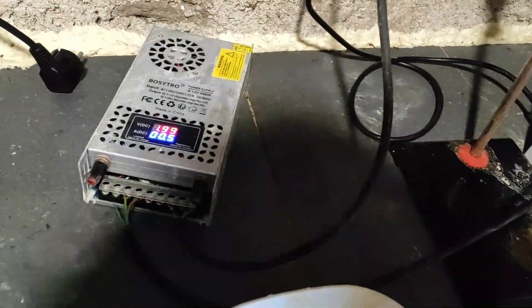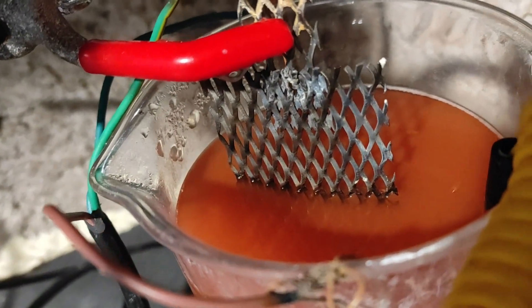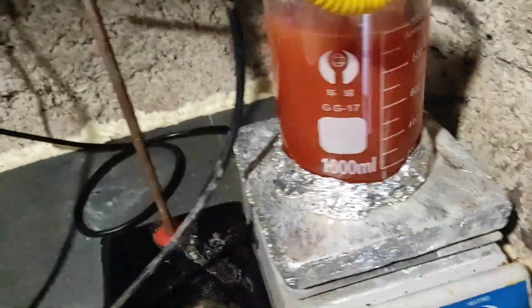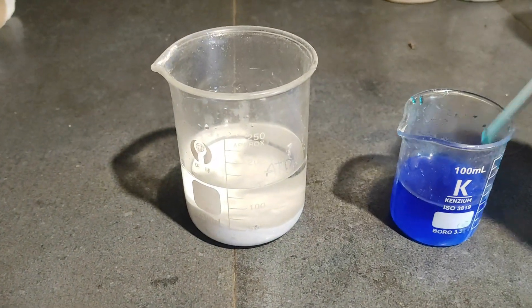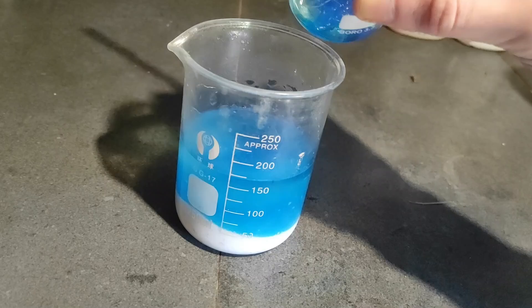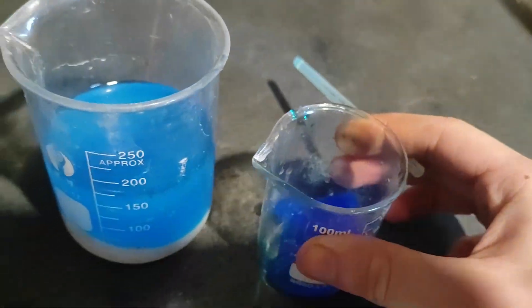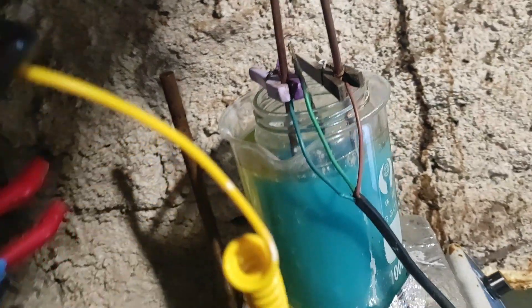Now that we have our ATO-plated titanium, the last step is to coat it with lead dioxide. There are actually two different plating baths we can use. I already showed the alpha plating in the last video using lead(II) oxide and sodium hydroxide. This alpha bath is always needed and sometimes might be sufficient by itself, but if you want a really good electrode, the best is to also do a second layer of beta lead dioxide. The solution required for the beta bath is 200 g/L of lead nitrate and 80 g/L of copper nitrate. The bath should be heated between 50 and 60 degrees, though it's not as critical as for the alpha — going 10 degrees over is still fine. The electrode should be plated at 4 to 8 mA per square centimeter. The good thing with this bath is that it plates faster than the first one and looks cool because of the copper — the beta bath is blue and the alpha is orange, so it's easy to tell them apart.